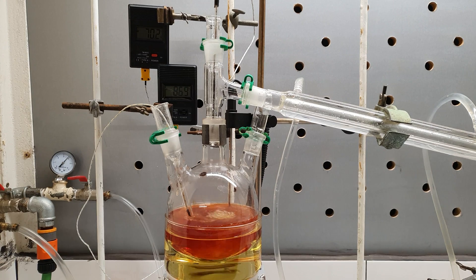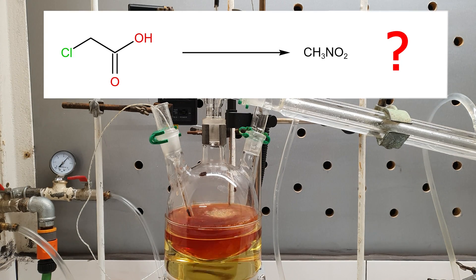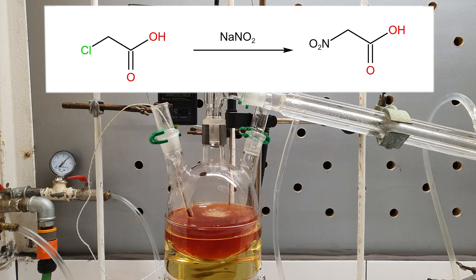Now I know what you're probably thinking. How the hell did he turn chloroacetic acid into nitromethane? Well, as I said earlier, the first step is to substitute the chlorine atom with a nitro group from the sodium nitrite.